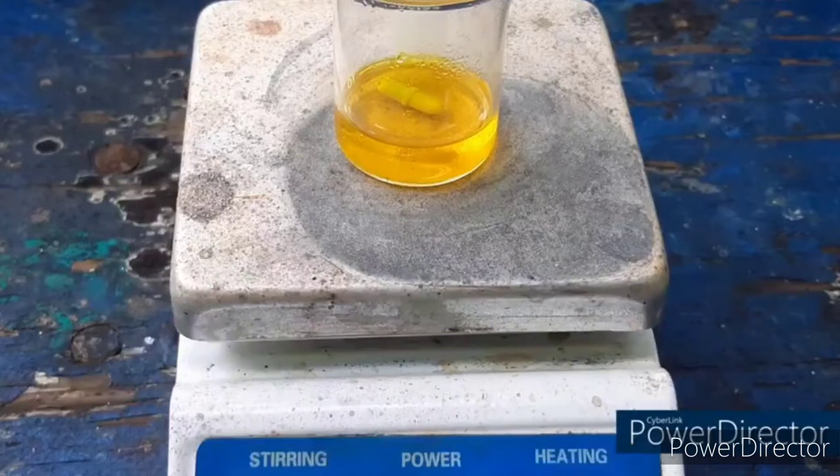It's okay — you only missed the first few drops of ammonia going into the solution. I caught it right where it immediately turns opaque and yellow, and you can see it from where it's opaque and yellow. You didn't miss anything. So we're salvaging this.